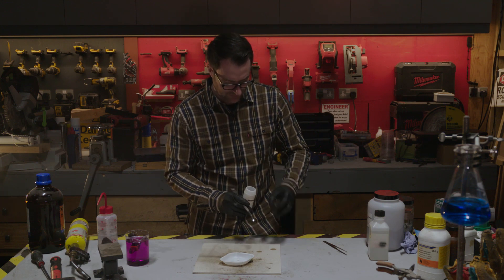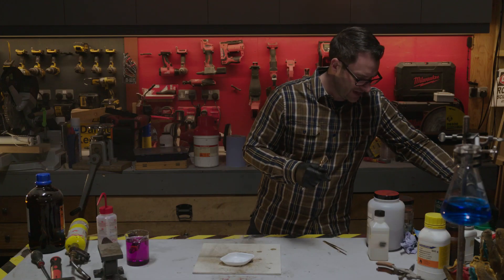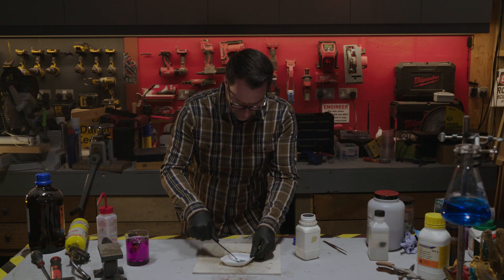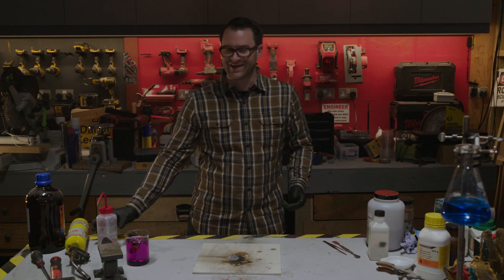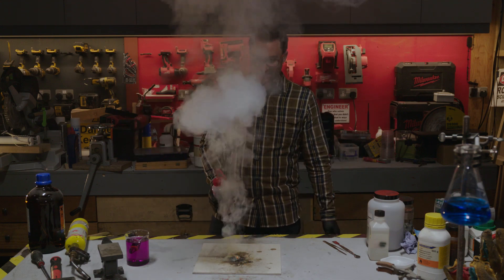And there's another chemical called Chemical X. It's a mixture of ammonium nitrate, ammonium chloride, and zinc powder. So a little bit of ammonium chloride, a little bit of ammonium nitrate, and then some zinc powder. Mix them all together, put them in a pile, and then — water igniting fire. Wow, that's surprisingly easy.